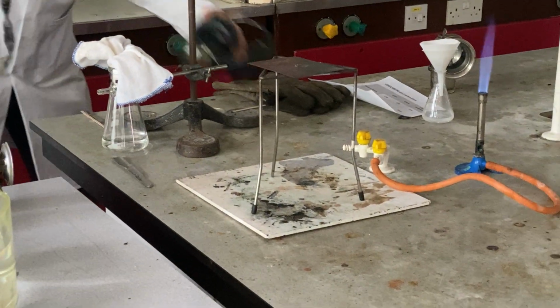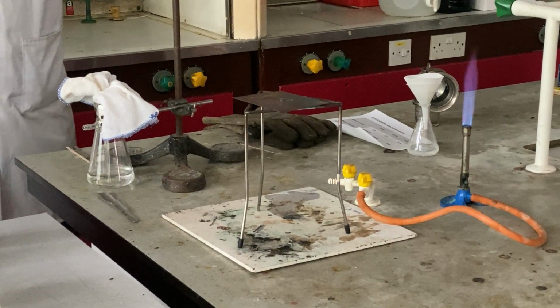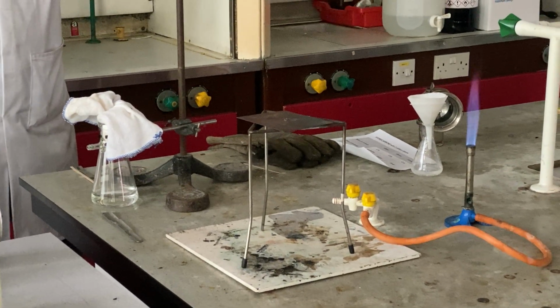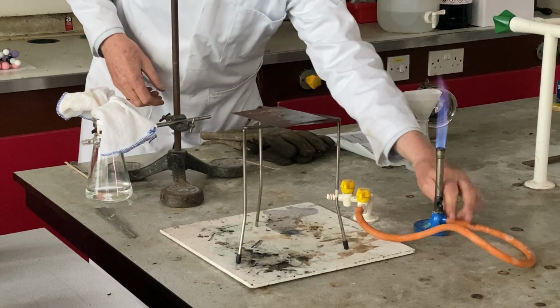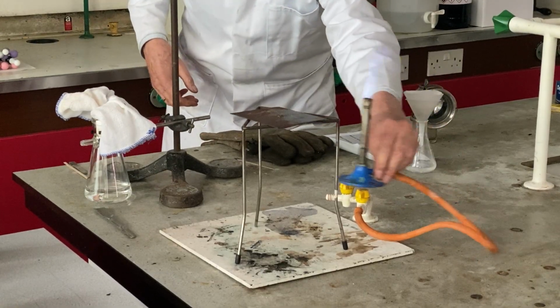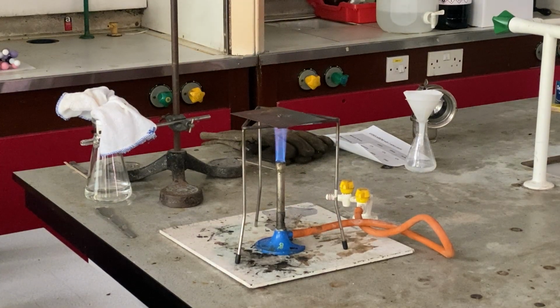Actually, sorry, I haven't practiced this bit, obviously, but here we are. Let's try once again. And now, that's right. So now we put the burner under. So this is a Bunsen burner, and I'm going to put it under here, and we shall listen. And as I said, this may go off in a few seconds, it may go off in a minute or two, but I think it's not going to be too long. And there it is, a small crack there. Perhaps there'll be another crack, we don't know, but you've certainly got the idea there. I'm just going to have a look.